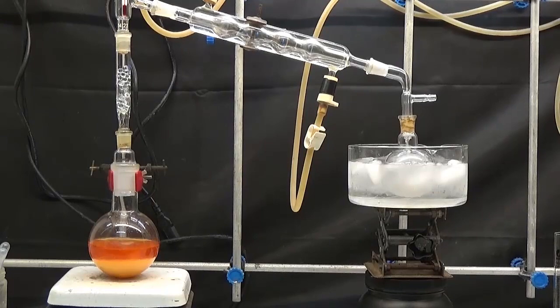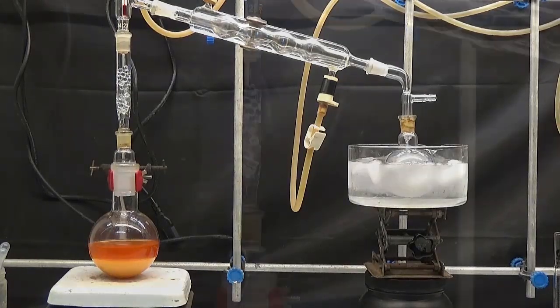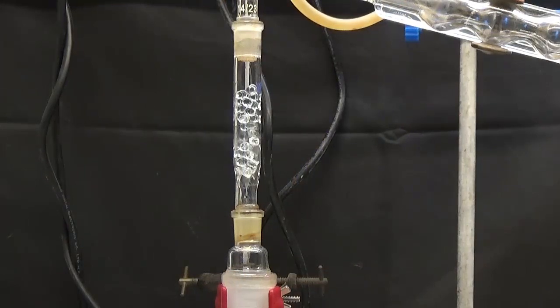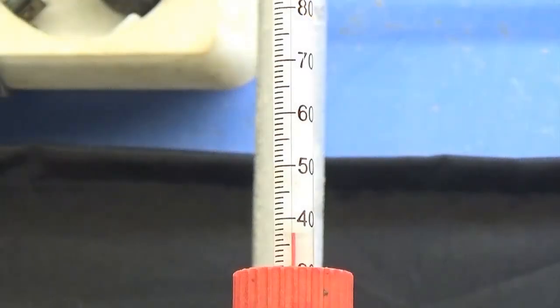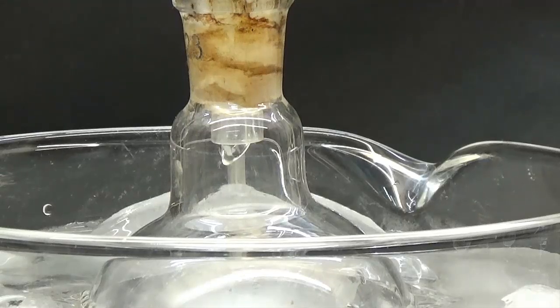We install distillation equipment with a rectification column. Ethyl bromide boils at 38 degrees. We heat the mixture to a distillation temperature between 35 and 40 degrees.